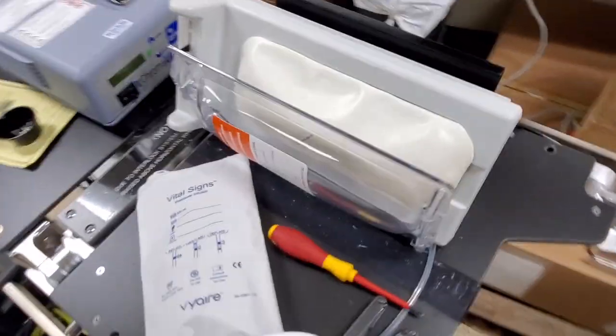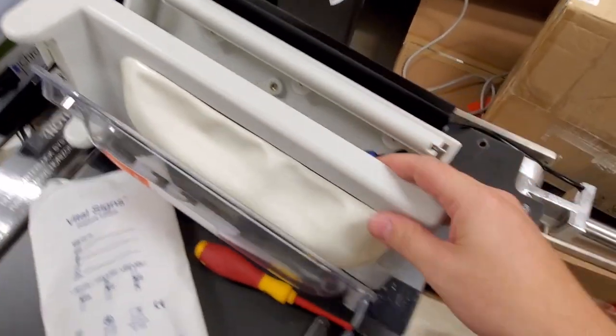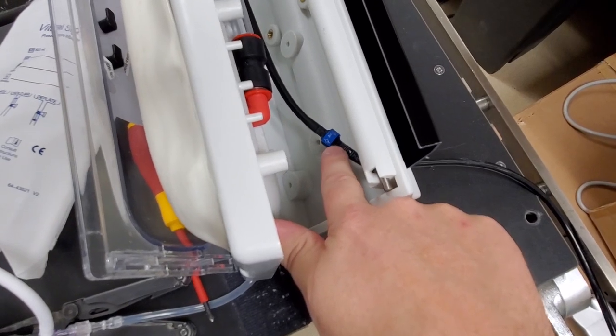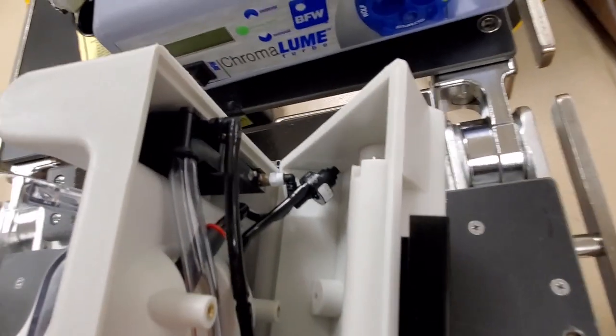So right here is the line, you can see I've got it disconnected. Let's take a look inside one of these because there are some things that you can do. As soon as the air goes in, you notice right here, I have a check valve. Comes up here where it's distributed.